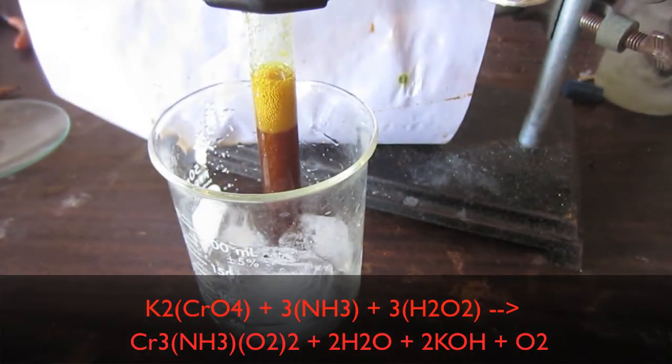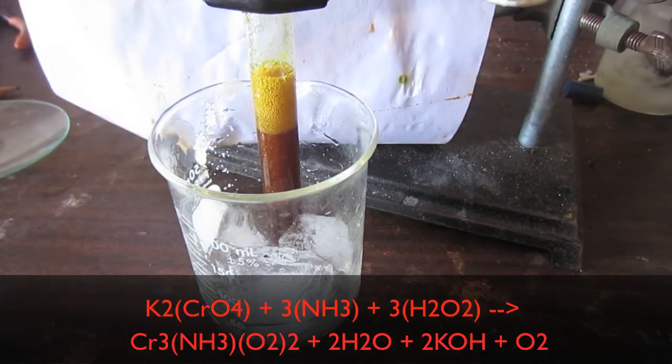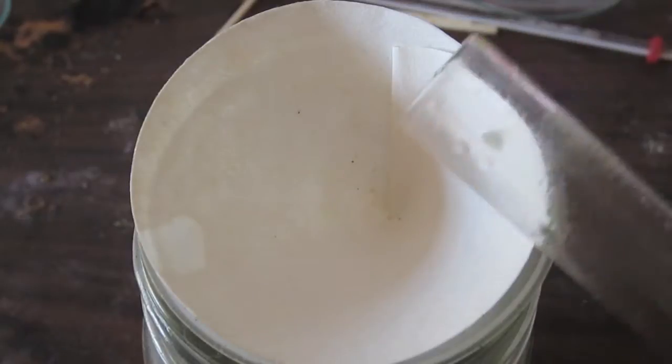You see that in solution, this compound makes a dirty brown solution, much like potassium tetraperoxochromate 5.